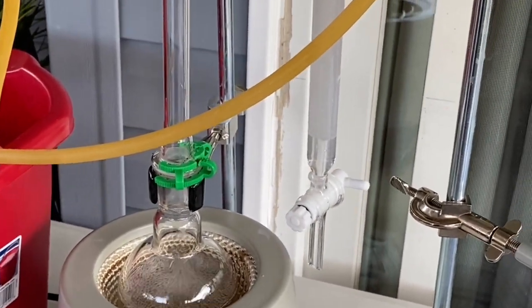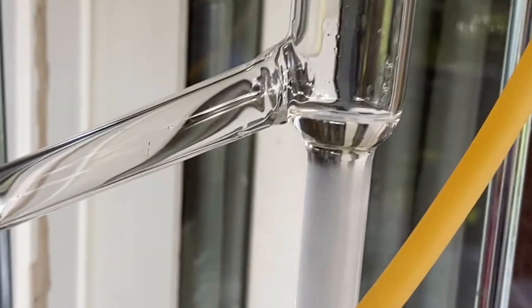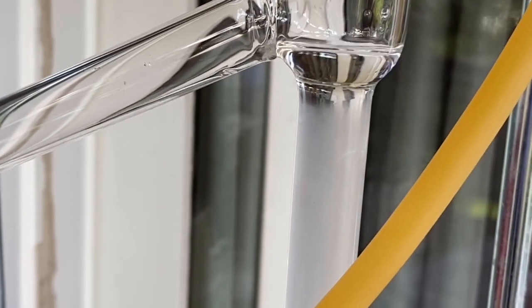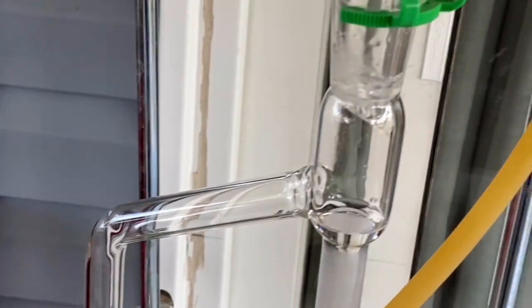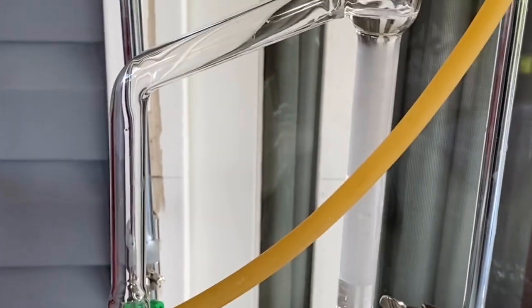All right, so just get a last shot of that. It's pretty cool. Interesting little piece of glassware. Oh! Did you see that? Did you see that big glob of water that just flew down there? Oh, I hope I got that. It was big. It went all the way down. Darn. I'm gonna try and get a shot of the water, and I'll be back.